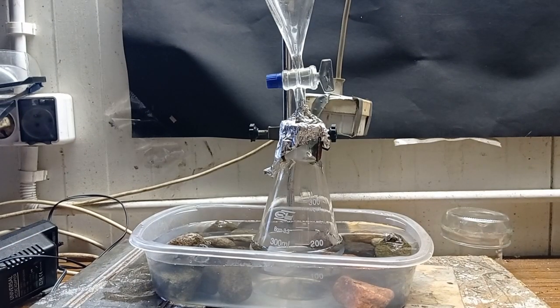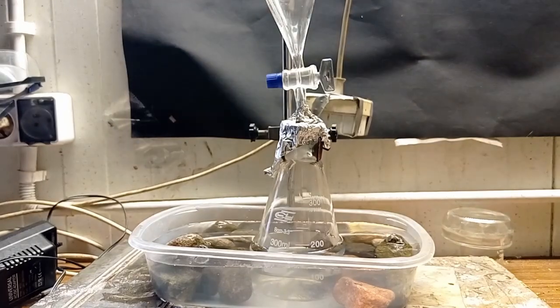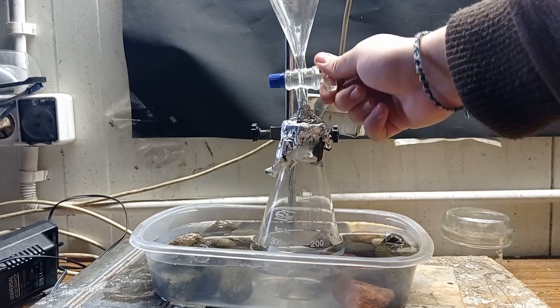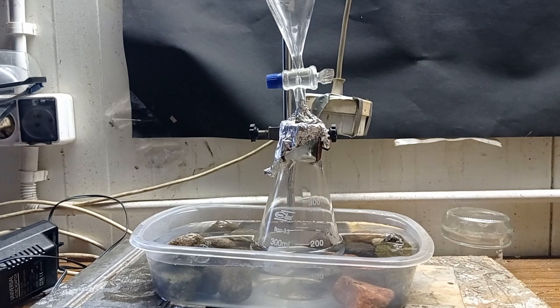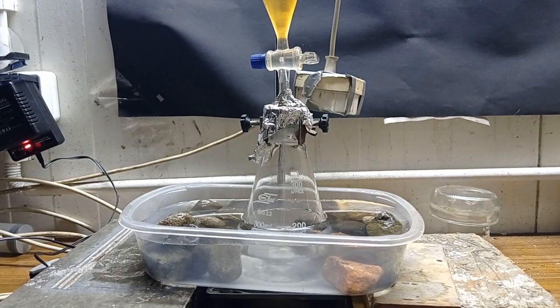Also at this moment I will turn on the fan, I mean fume hood, so there will be noise in the background. And now I can add my nitration mixture, and now drop by drop I'll add nitration mixture.